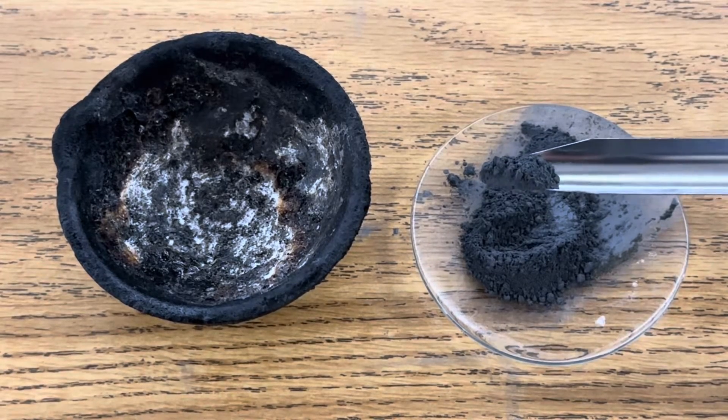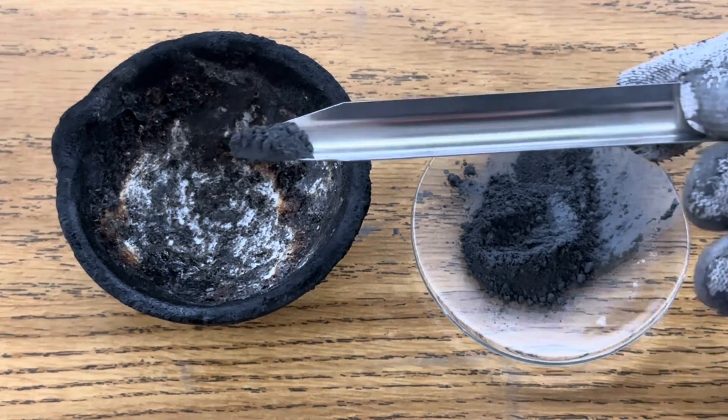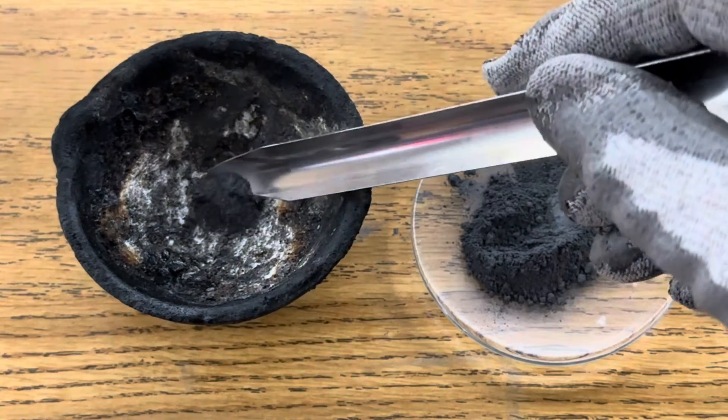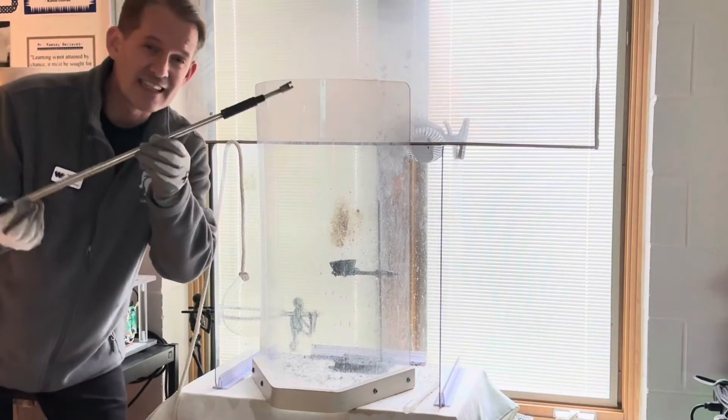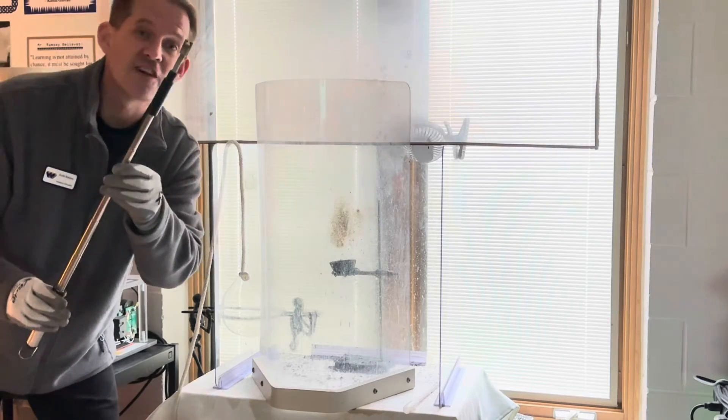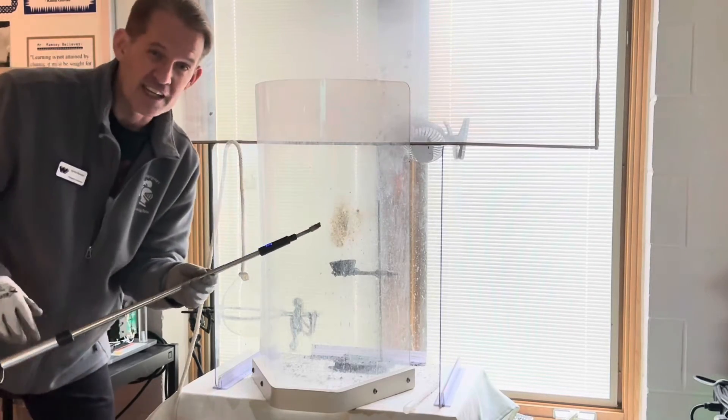Next we're going to deflagrate half a gram in our crucible and we'll put this on our blast shield for safety. Here's our blast shield. I'm using an extendable plasma wand just for deflagration. Let's check it out.